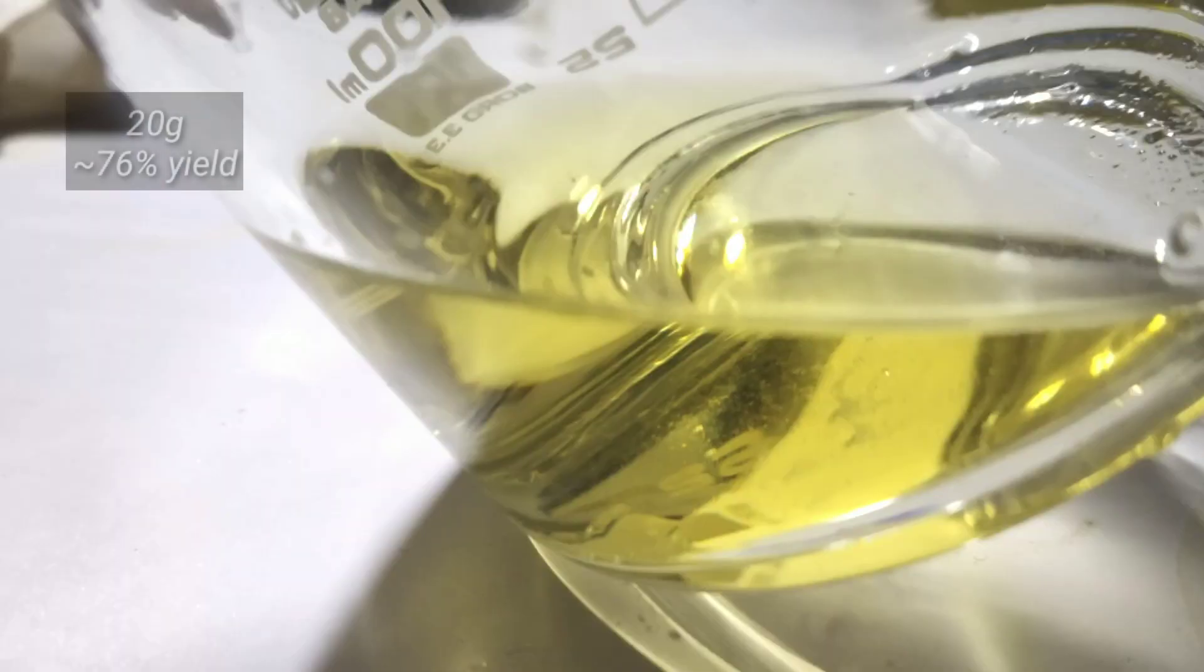If you want you can dry the product with anhydrous potassium carbonate and my final yield was 20 grams which is 76 percent yield.